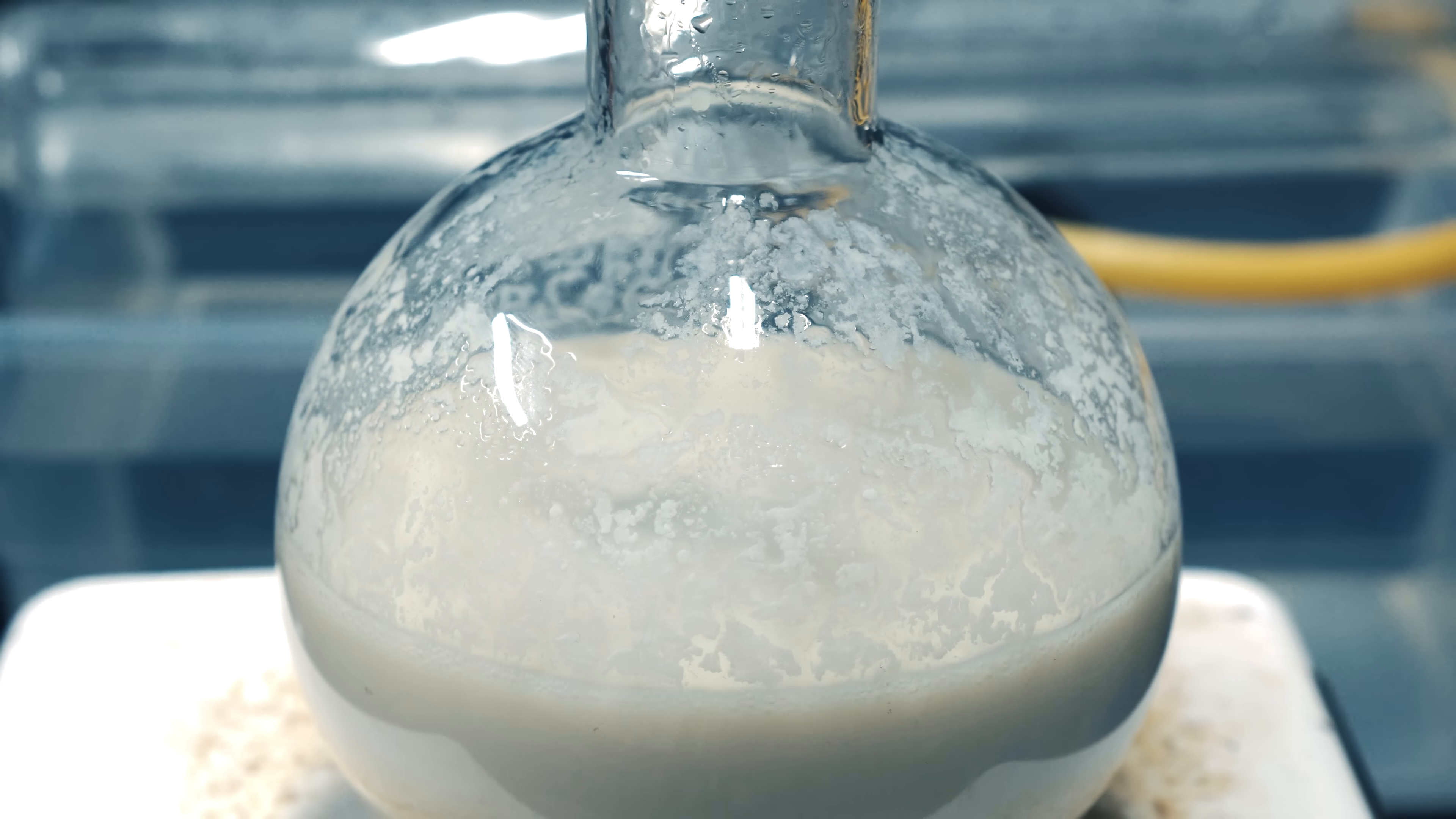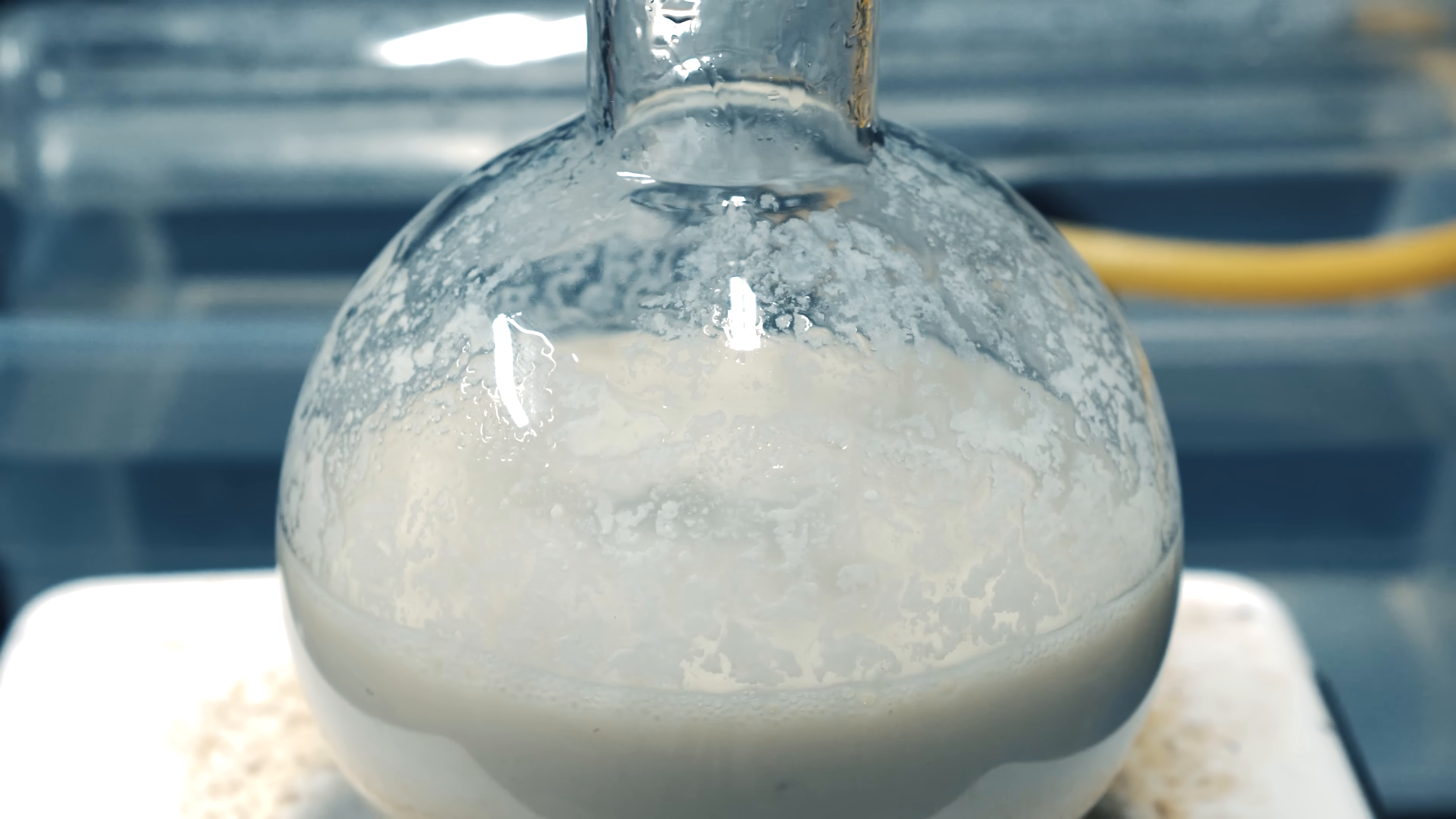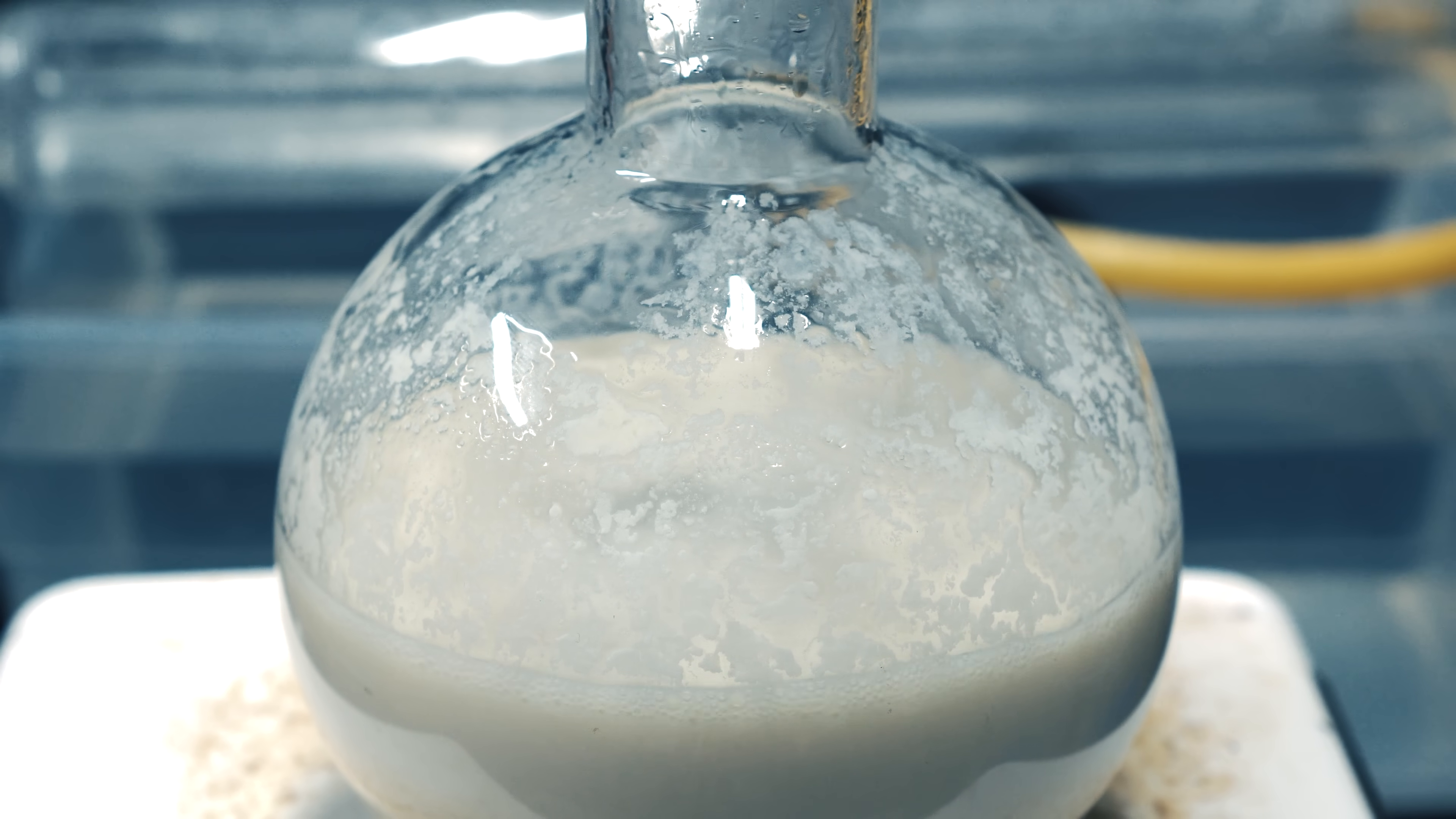When I didn't see any more vapors being produced from the beaker, I decided that the reaction was complete. This is what the beaker looked like at the end and there's a lot of byproducts in there.